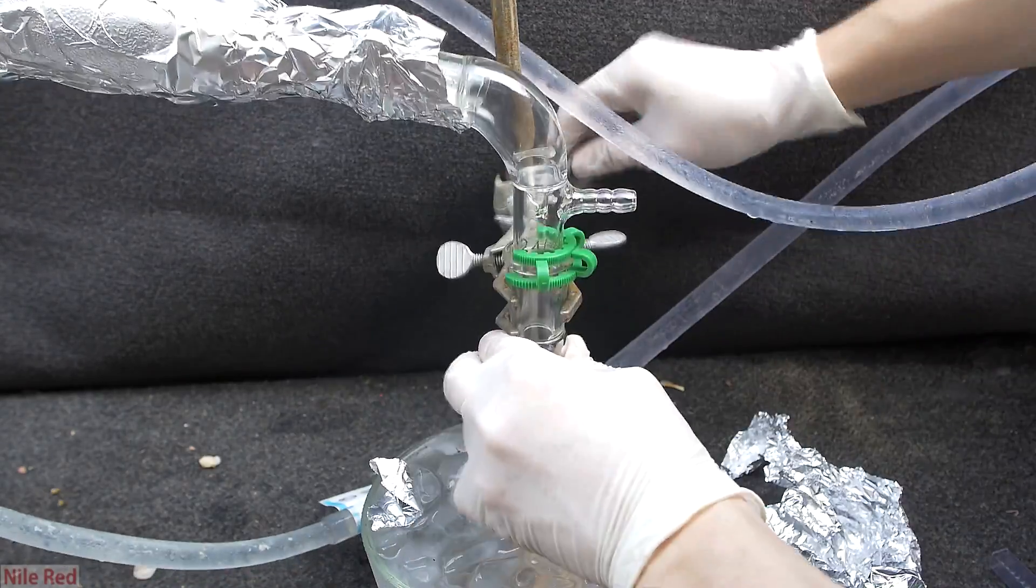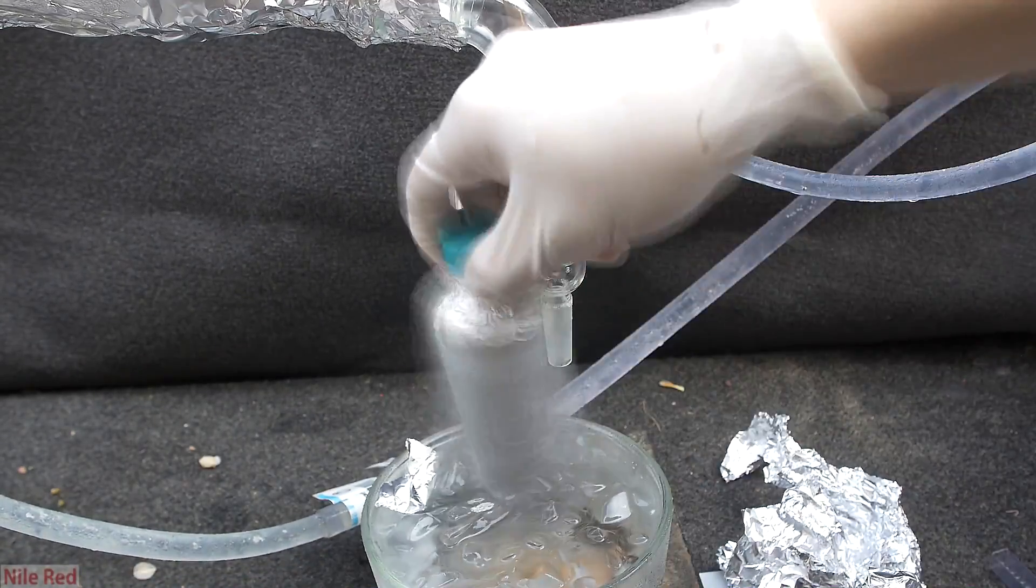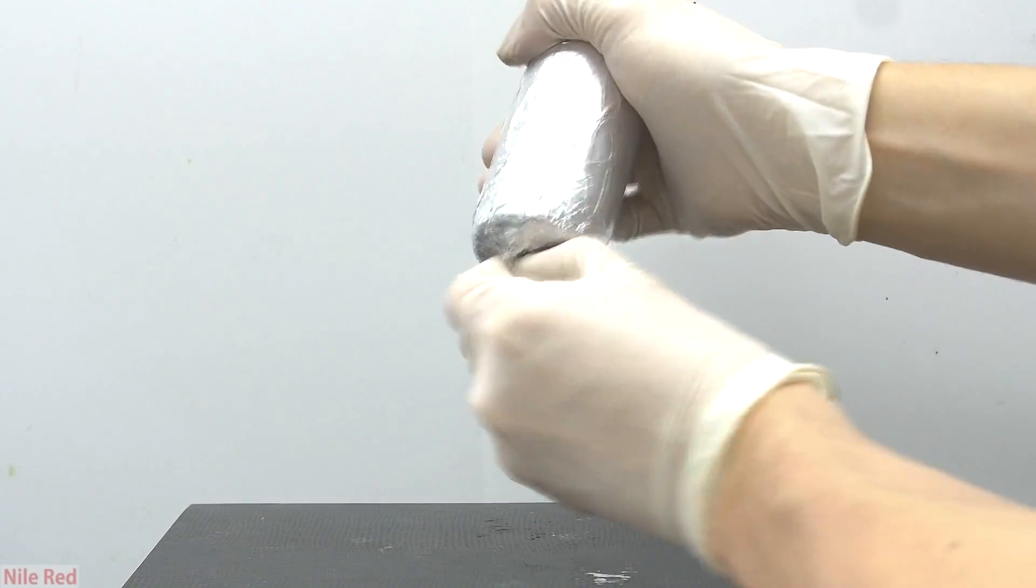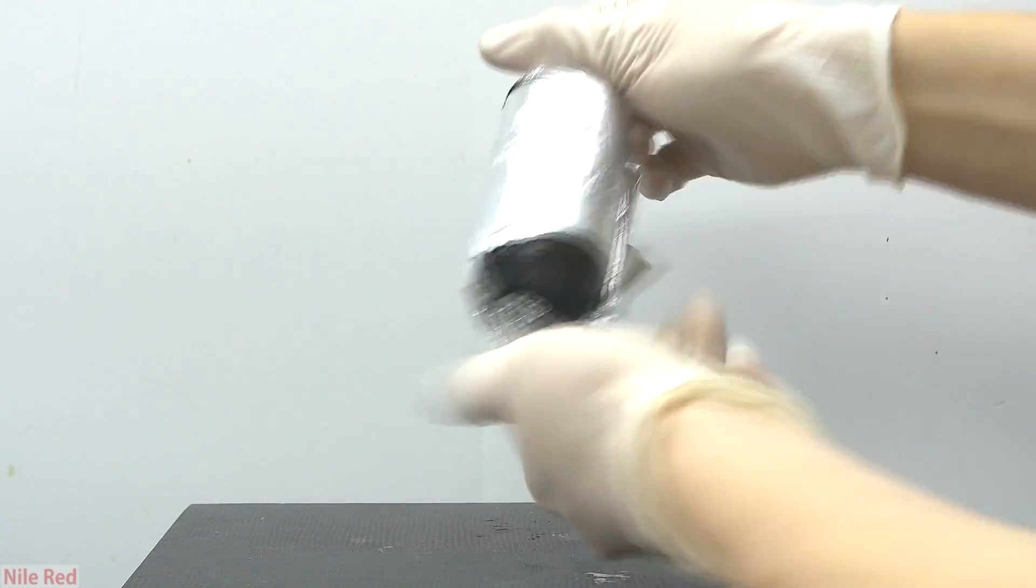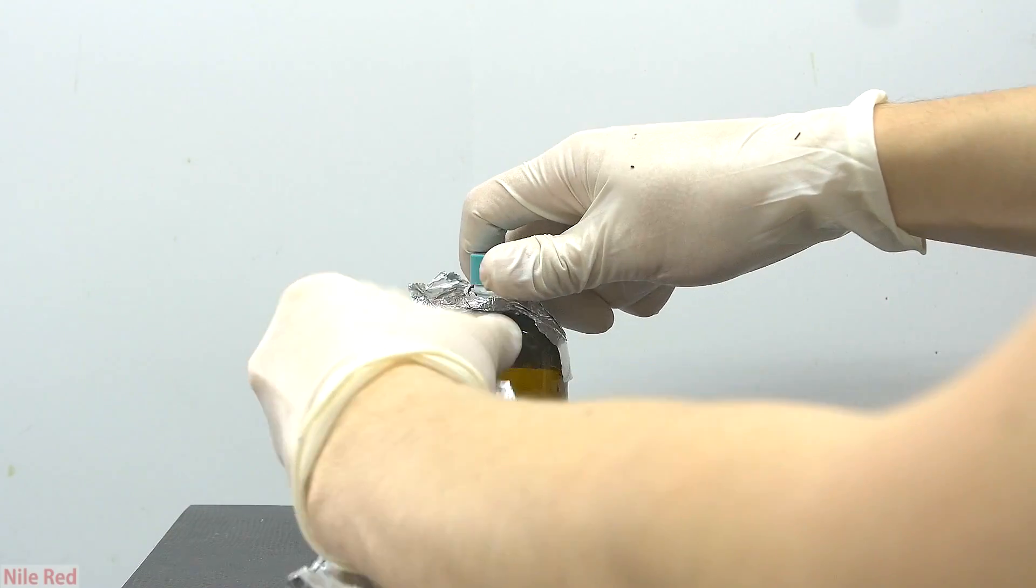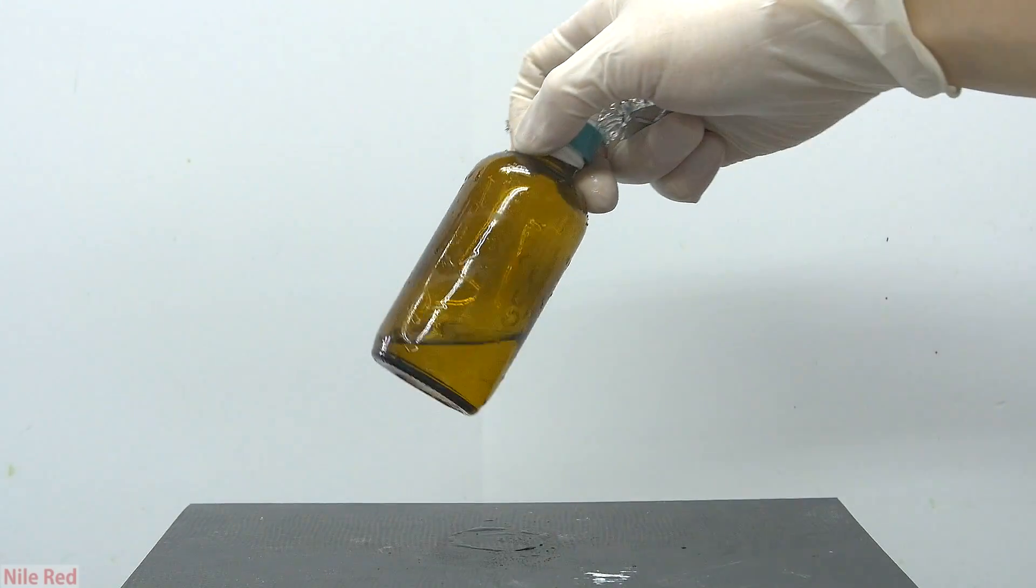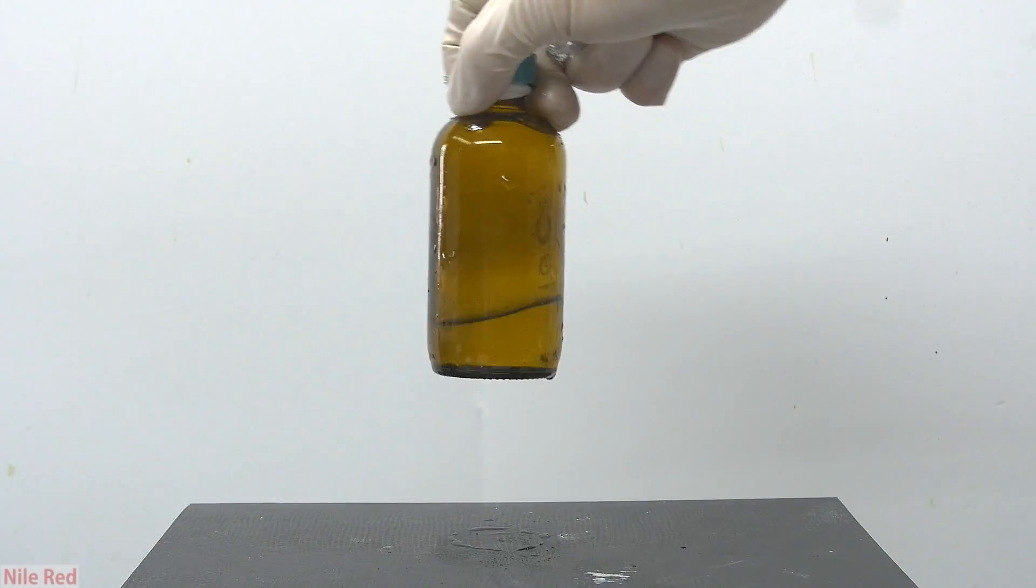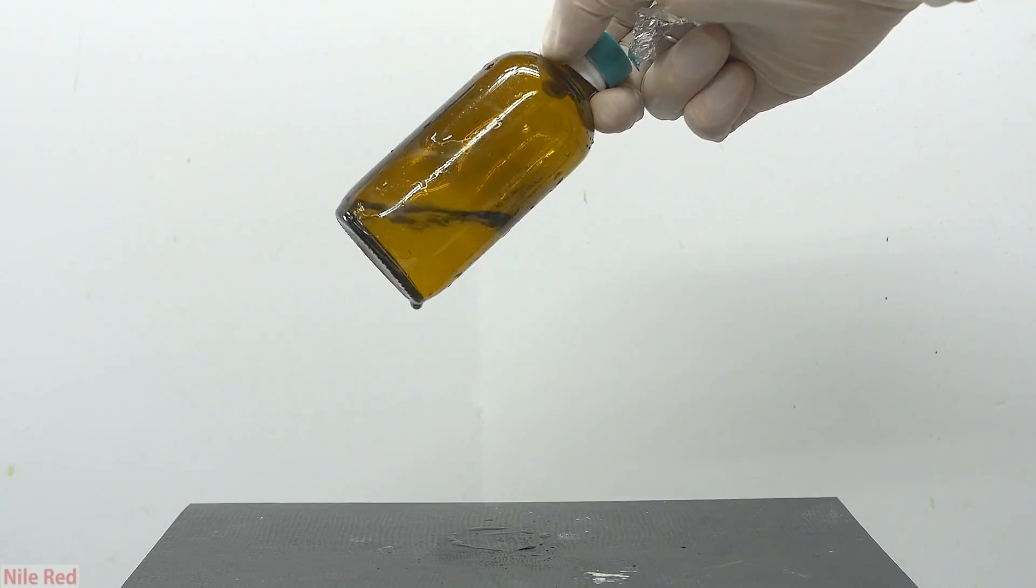At the right side, our receiving bottle is removed, and it's immediately capped. I take the final acrolein product inside, and I remove the aluminum foil just to see visually what we got. And what we see visually is pretty anticlimactic, because acrolein is just a colorless liquid.